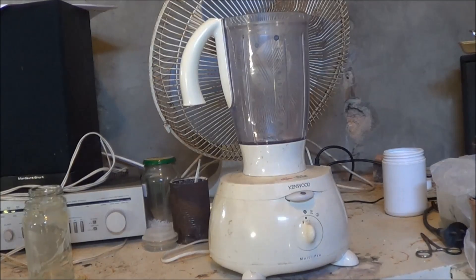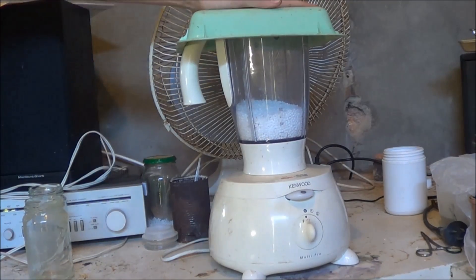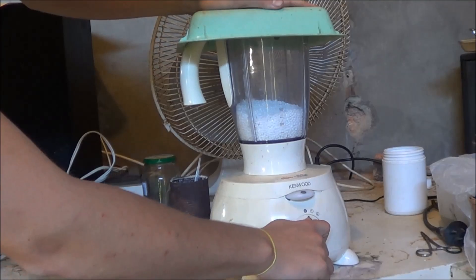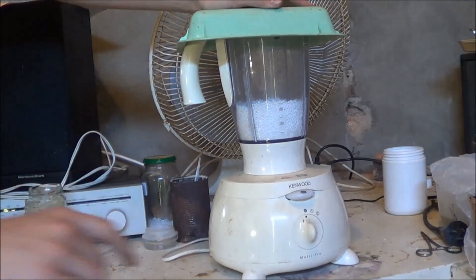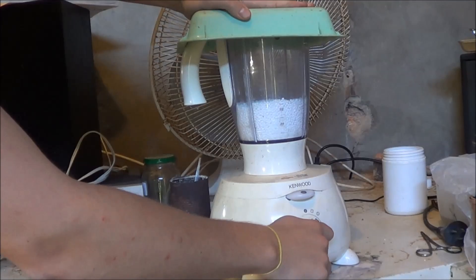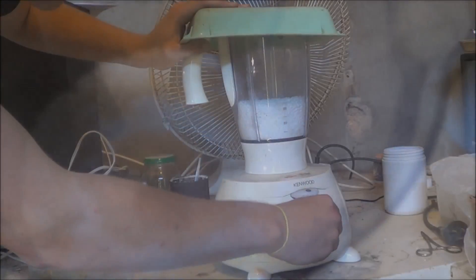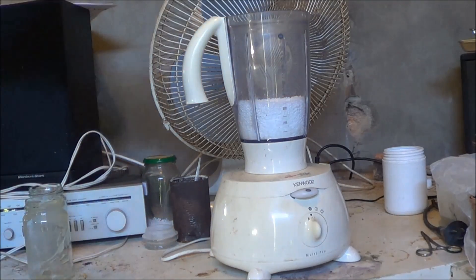Good news, the blender does appear to work. Bad news, it doesn't have a lid. What could possibly go wrong? Don't try this at home. Oh god, that's loud, where is my hearing protection? Let's try that again. Wow, everything went better than expected.